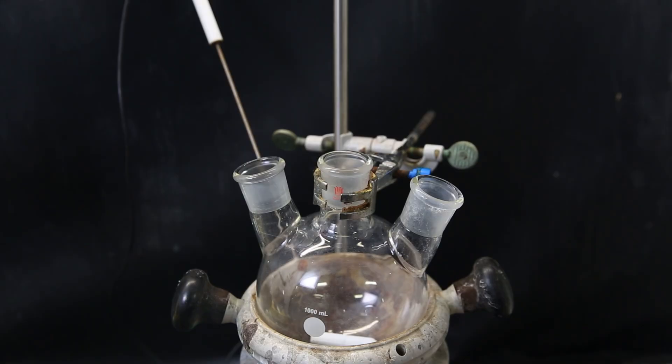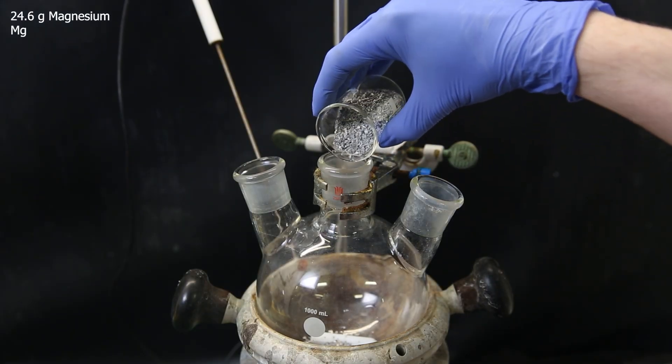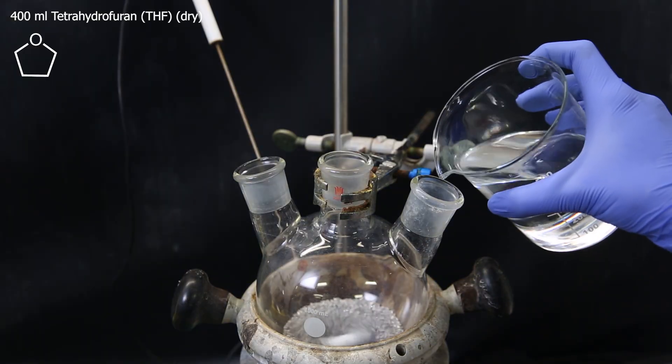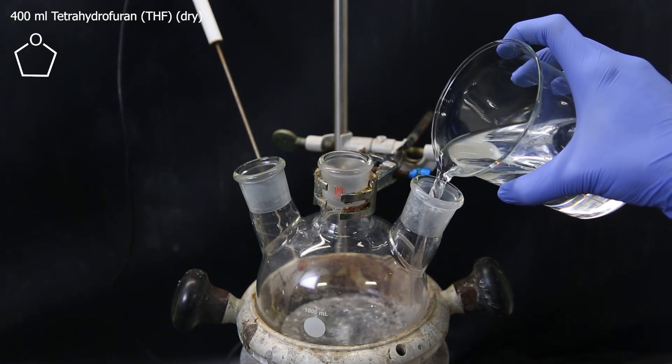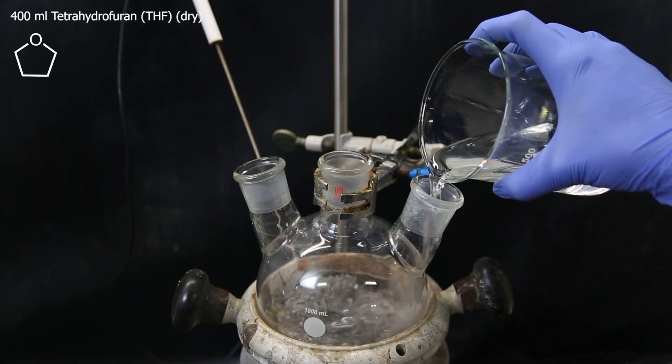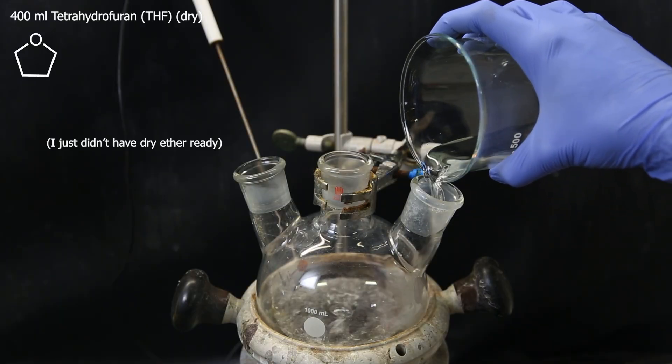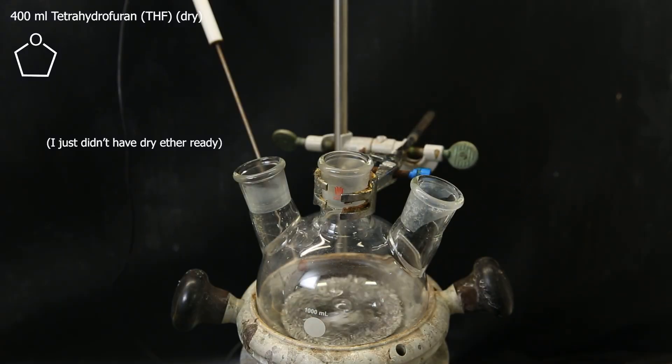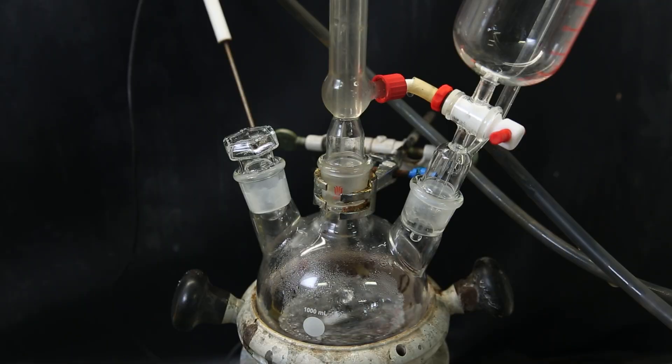Now it is time to prepare a Grignard reagent, so I have set up a large three-neck flask with a stir bar, and add in 24.6 grams of magnesium flakes. I then cover this in 400 mls of the solvent tetrahydrofuran, which I dried with molecular sieves. Diethyl ether can of course also be used. I already started heating the mixture to a reflux, and I attached a stopper, condenser, and a dropping funnel.